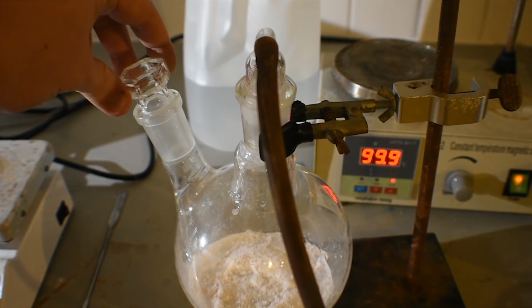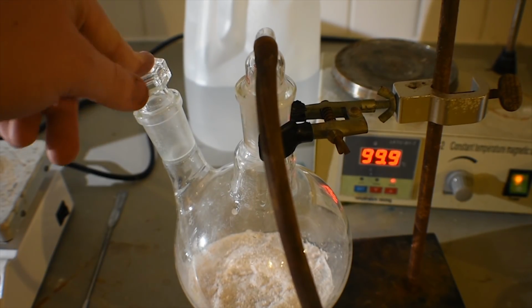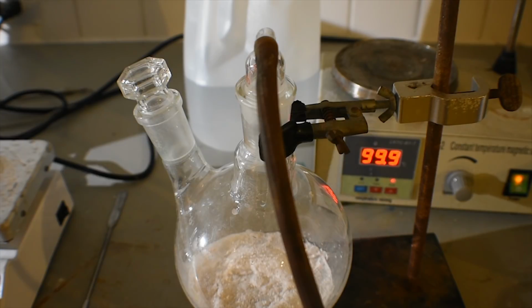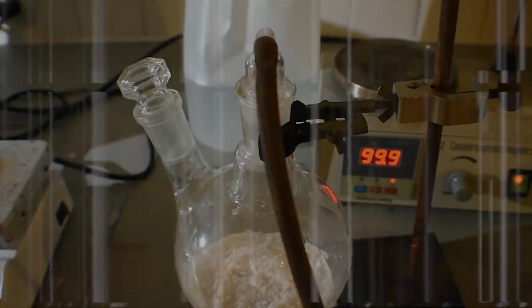So periodically I'm just going to remove this stopper and add some hydrochloric acid, then restopper it to resume the flow of chlorine. And we're literally just going to pass chlorine through a potassium thiocyanate solution, which will generate perthiocyanogen. It's that easy, really. So, with all that being said, let me go outside, and luckily for me it's actually pretty windy out, so that should blow the chlorine, or any chlorine that makes it through the thiocyanate solution, away from me. So, let's get to it.